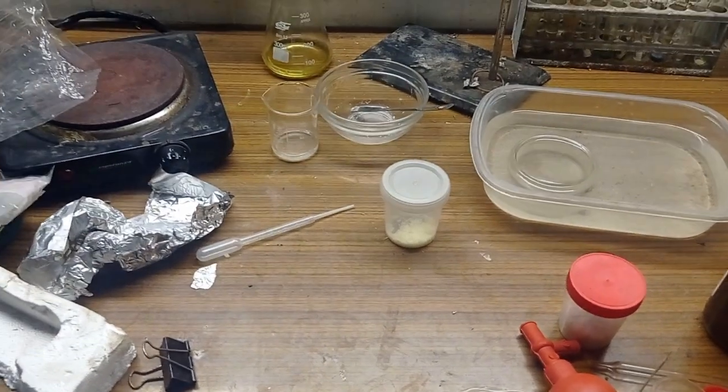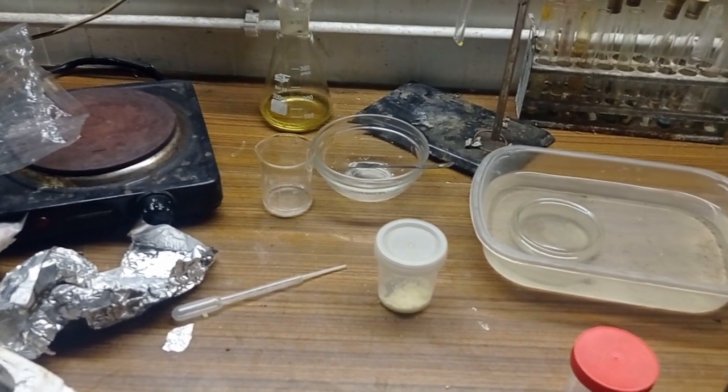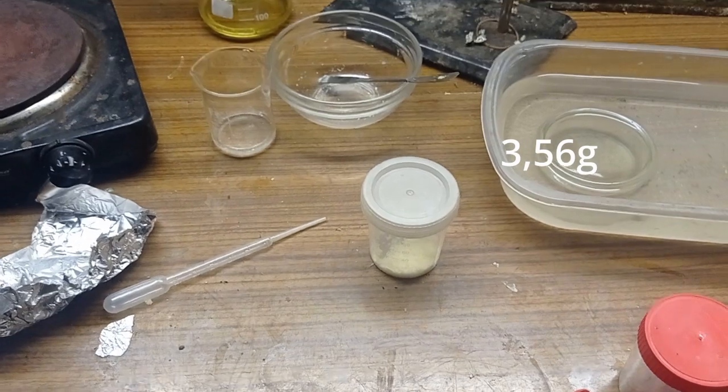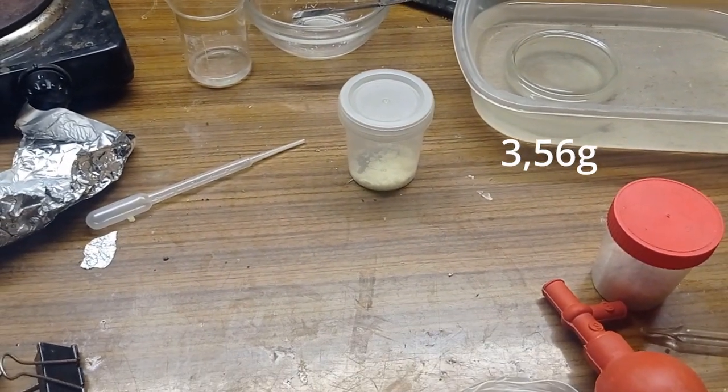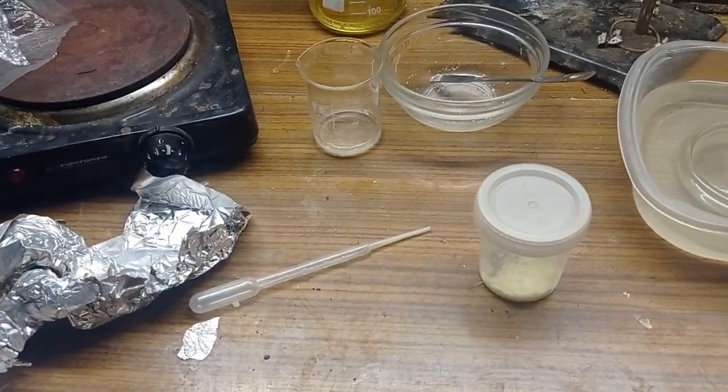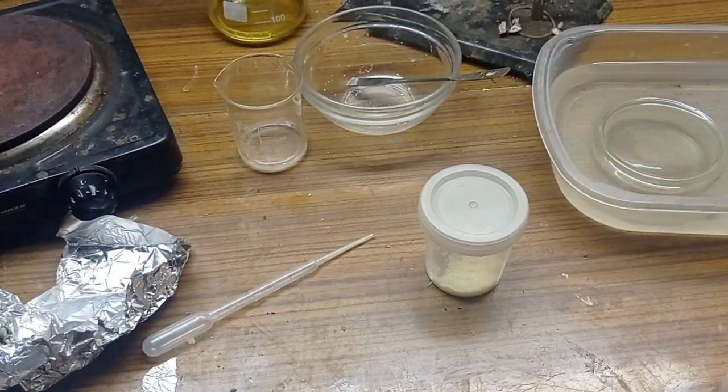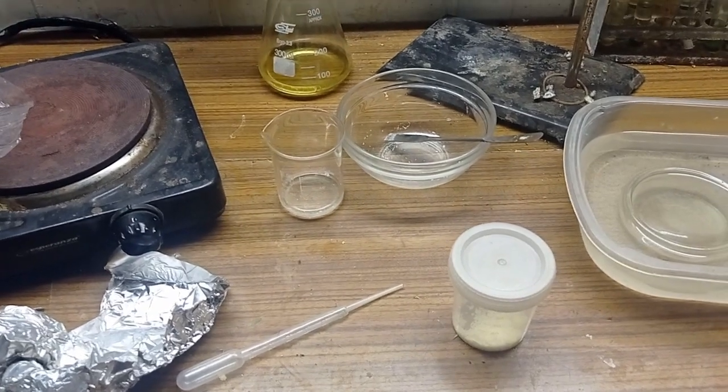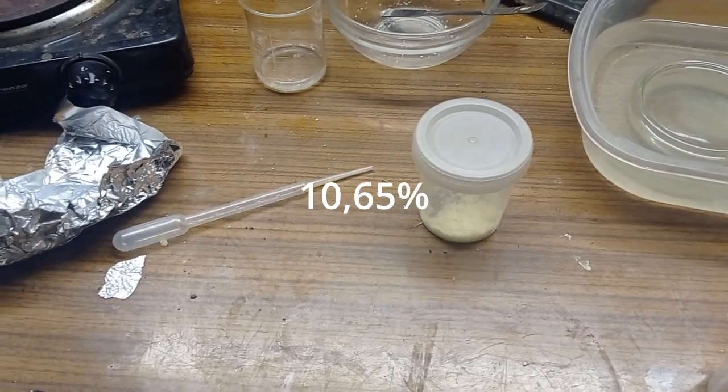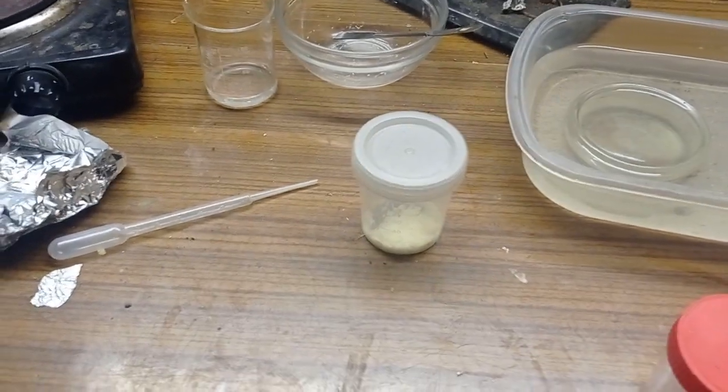So here I am and I don't even know if I'm more embarrassed or pissed off, but here I am with my 3.56 grams of para-nitrotoluene. You know what? I used 68 grams of toluene, so you can imagine how much I should have gotten. Theoretically I should get 33.42 grams of para isomer, so this is 10.65% yield. I'm not even sure if it's completely right or totally pure. True yield is probably even lower.